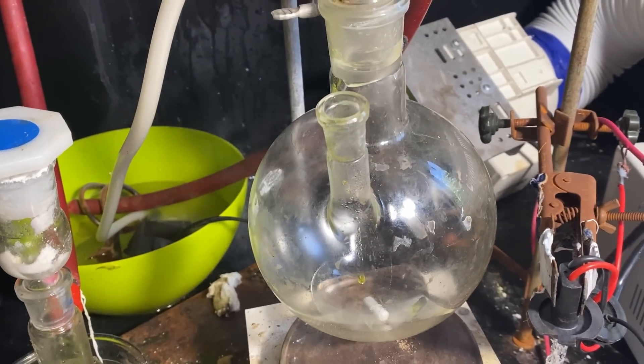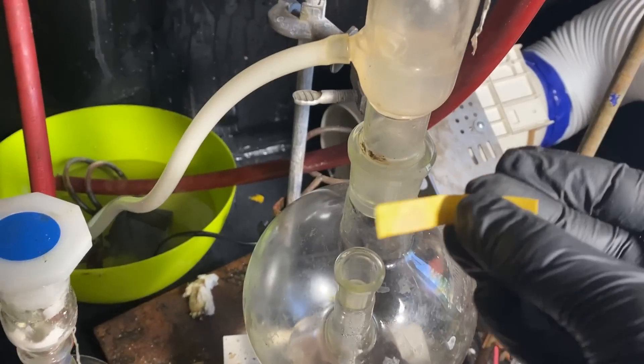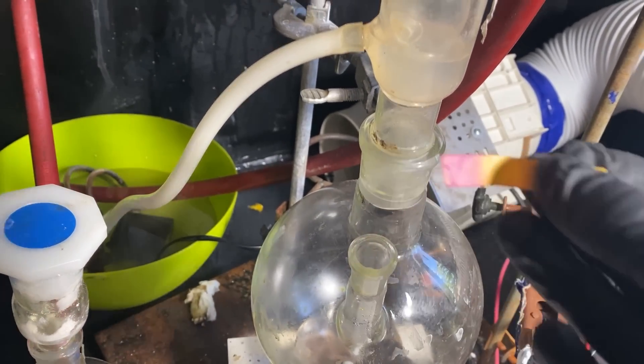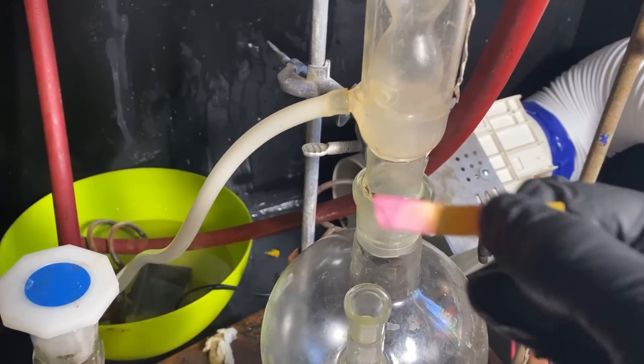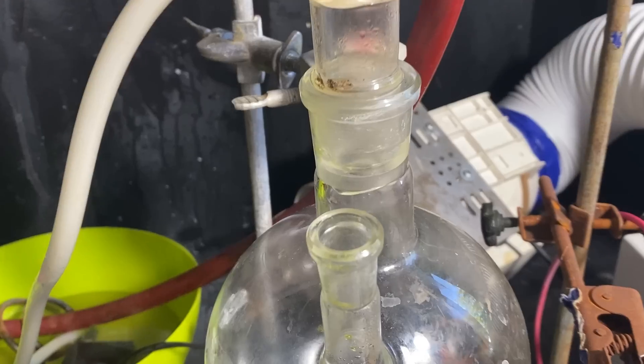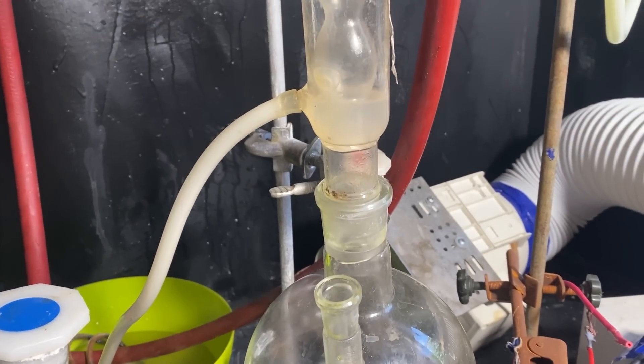Here, I've let the reaction vessel cool down, and you can see how a white fuming vapor is seeping out of the reaction vessel. I've also tested this with pH paper and it turned red. Granted, this could be chlorine, but given how thick and light those fumes were, I think it was some hydrochloric acid, which would mean that the desired reaction has happened. There was also a thought that crossed my mind that this was actually phosgene gas, but I'd rather not believe that.